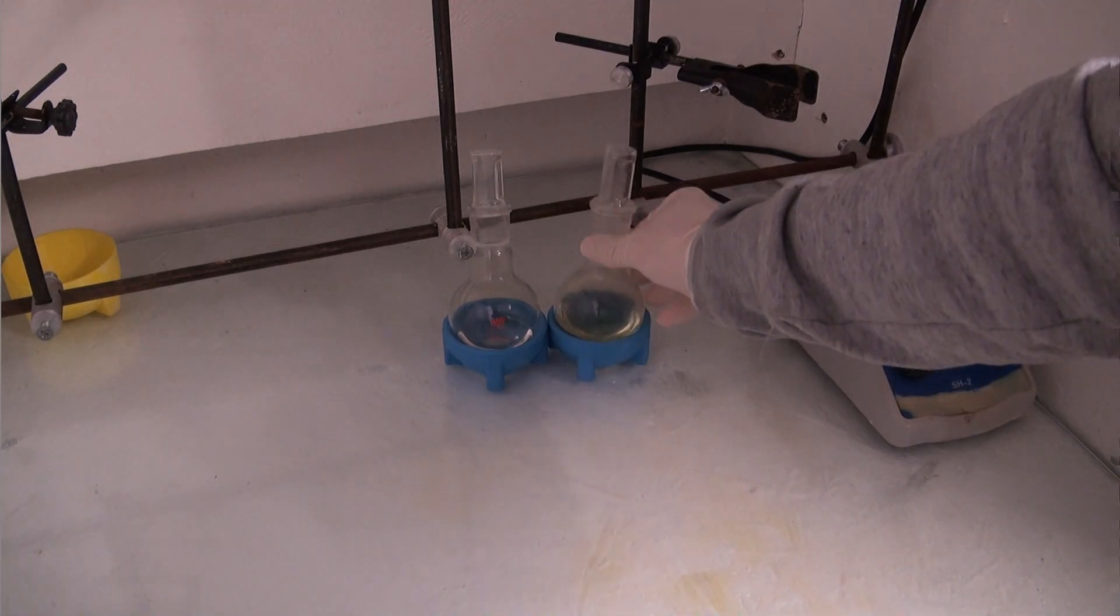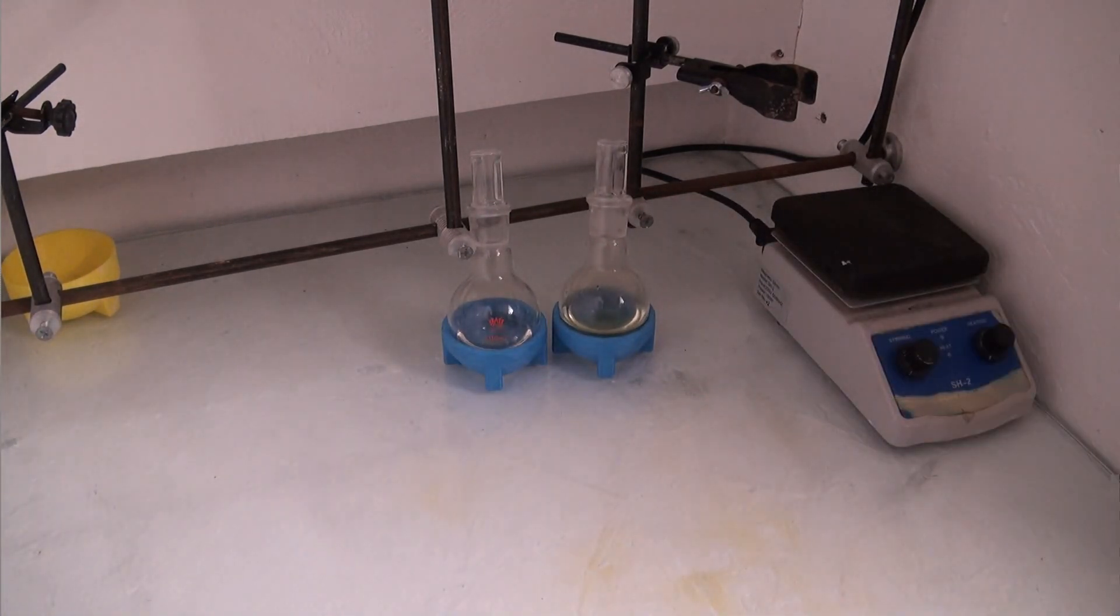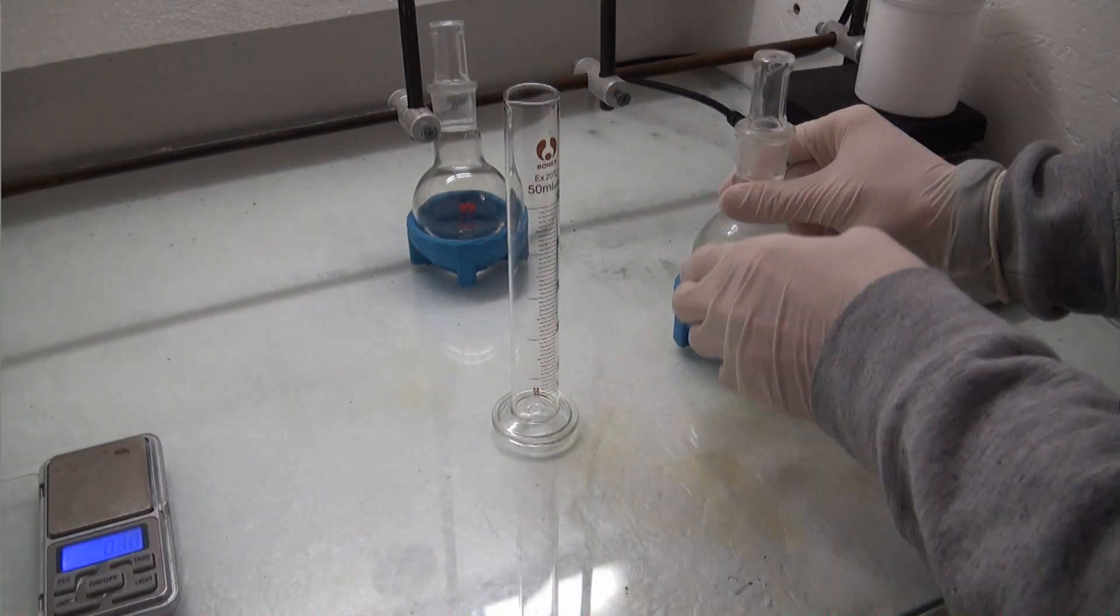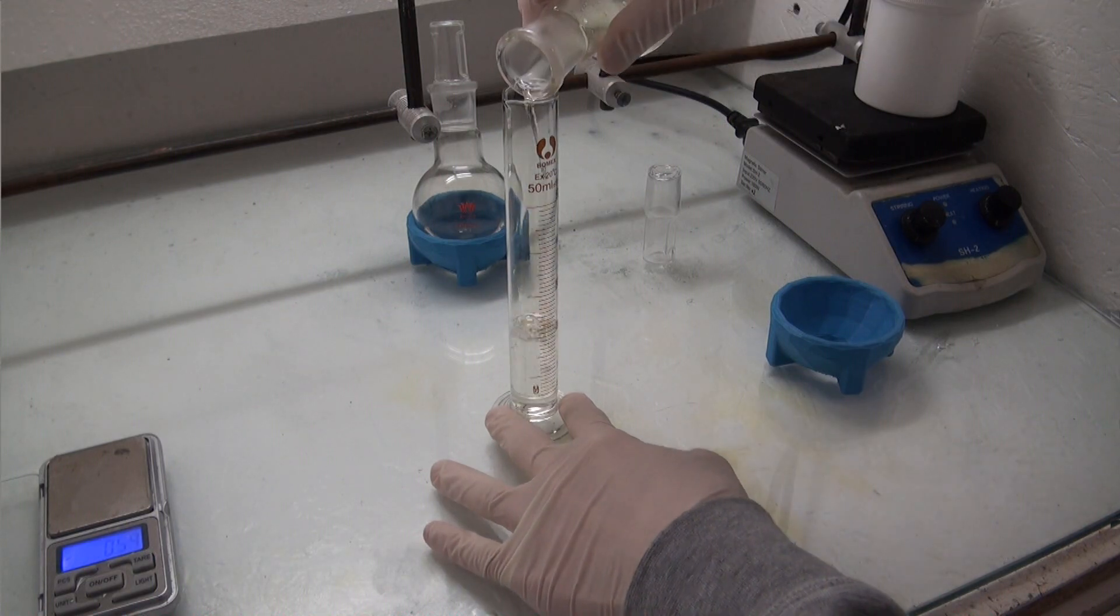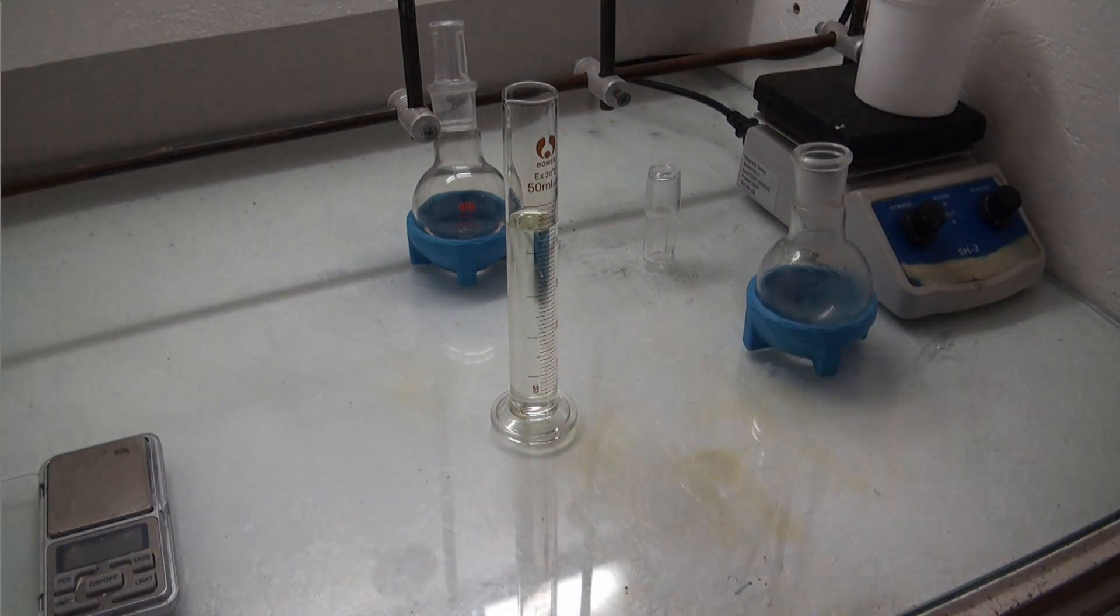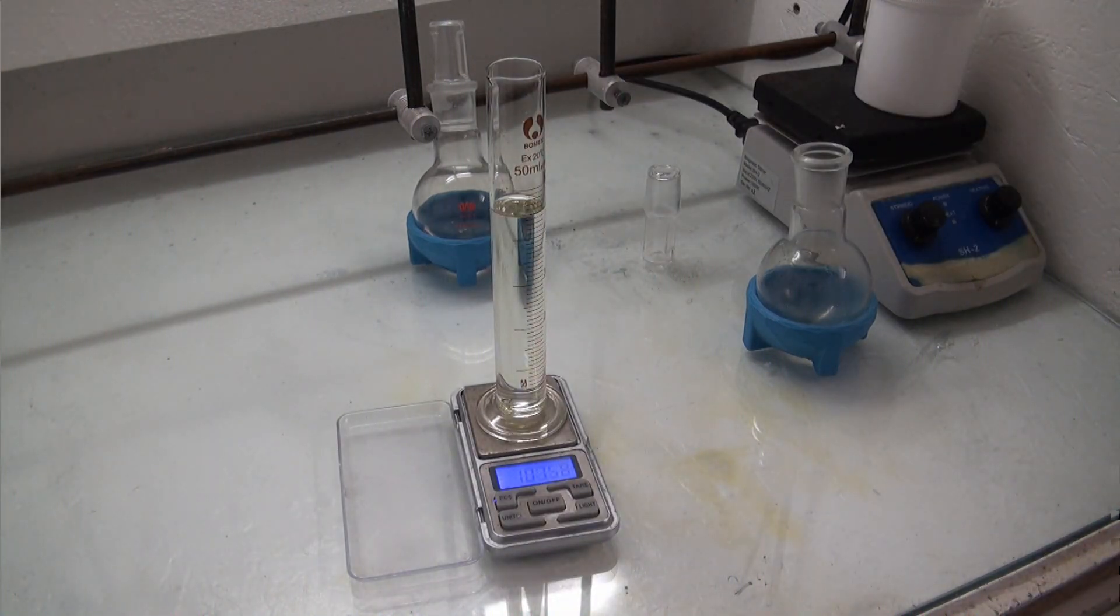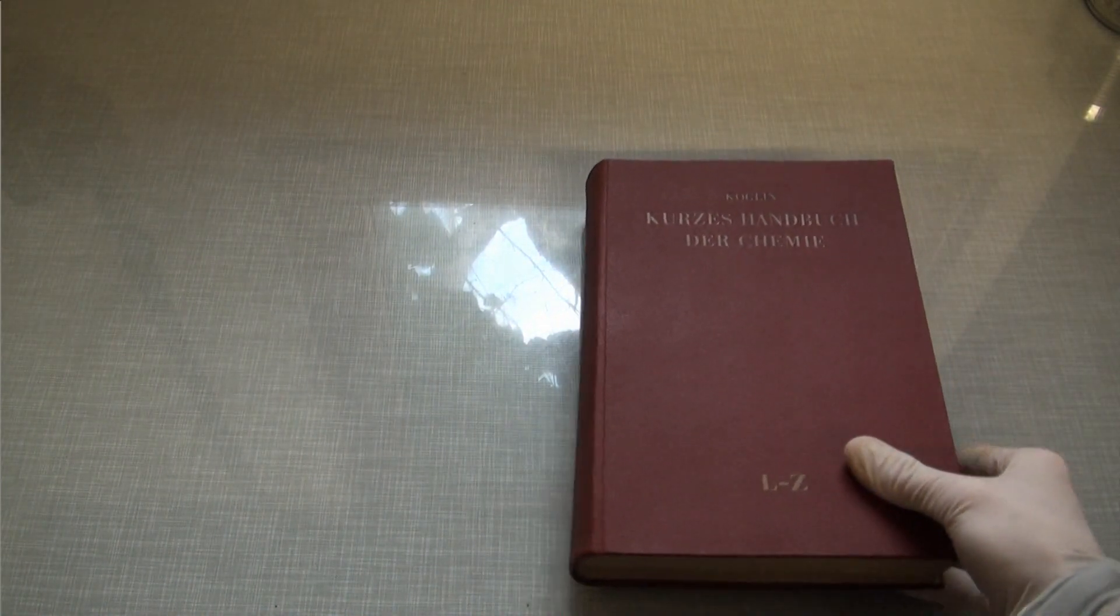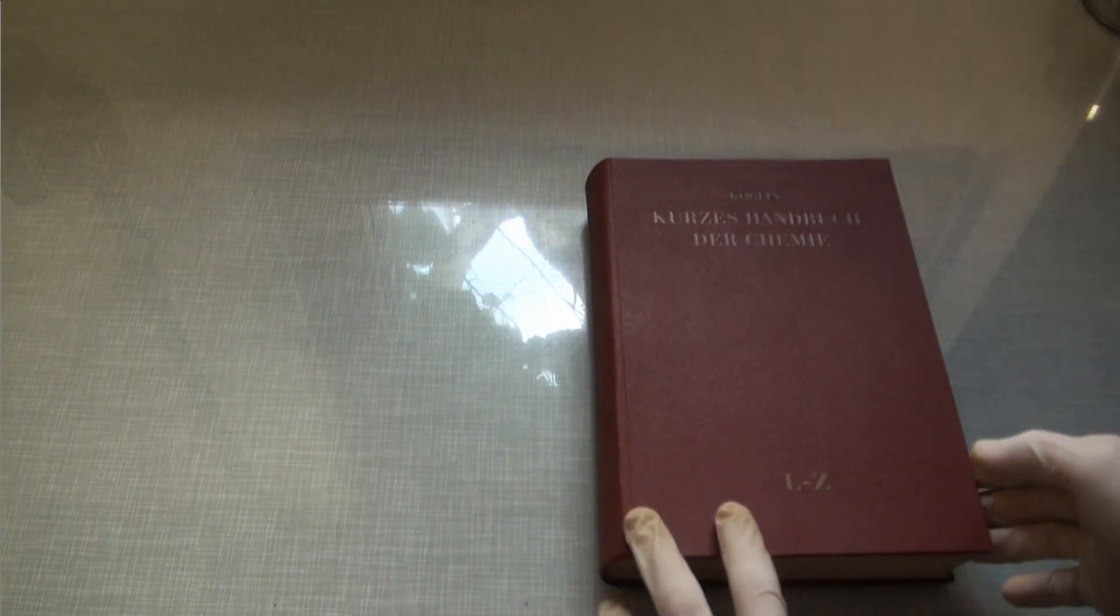But anyway, to find out which one of those reactions was better, I needed to calculate the yield. I measured the weight and the volume of both acids, which gave me the density. From this, I was able to find out the concentration using this book. It is called a handbook of chemistry and contains a lot of useful data.